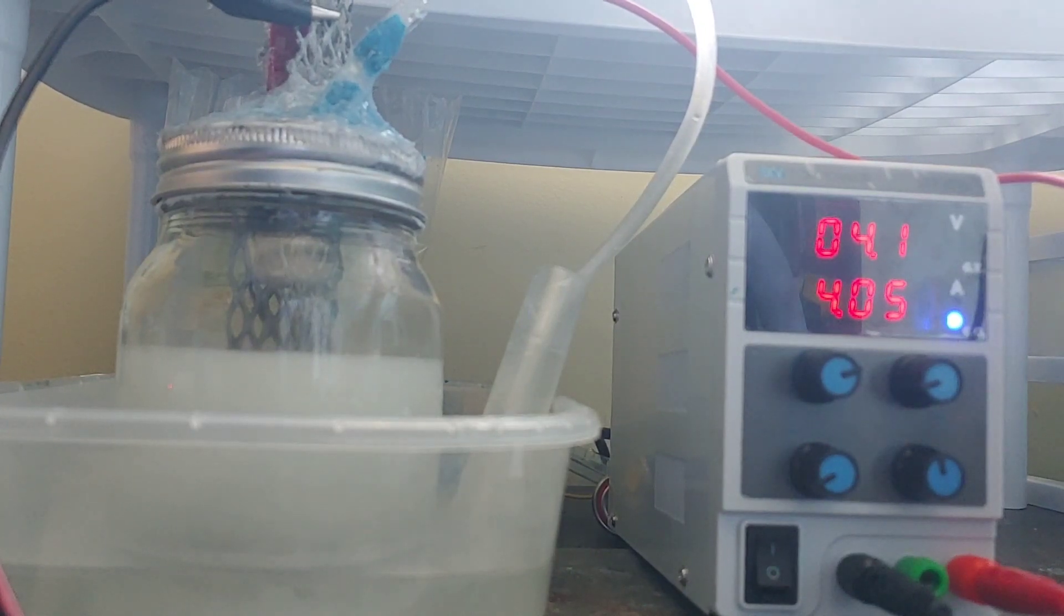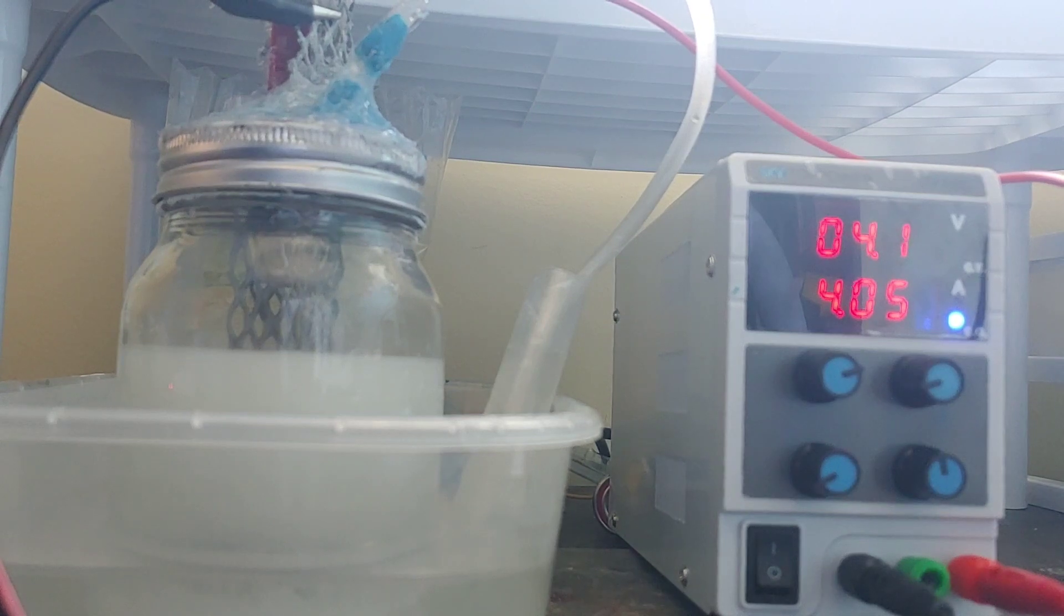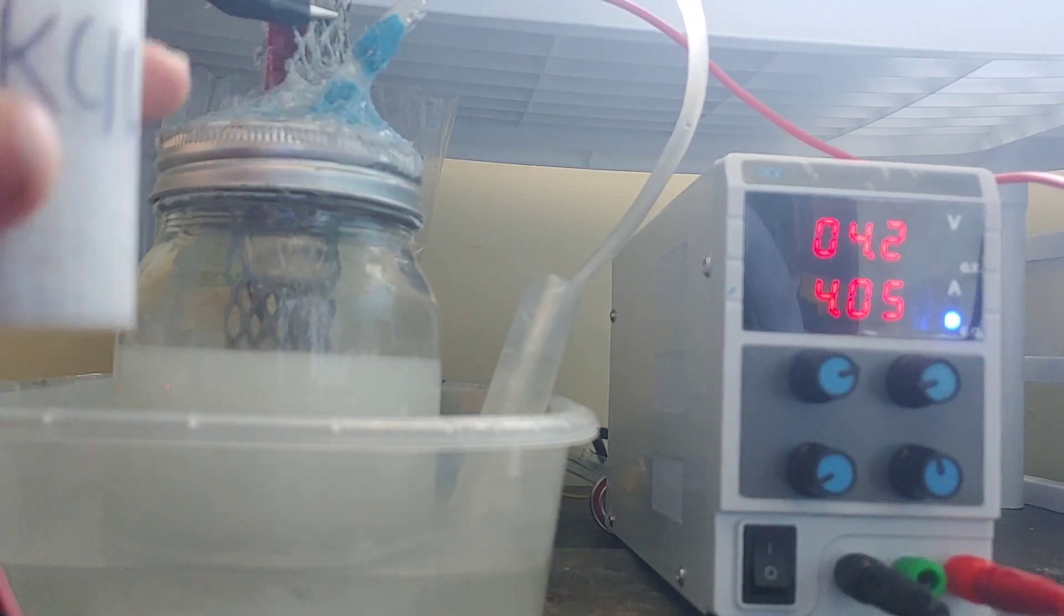This is like some silicates, I think. I'm not even sure. I think there's even some magnesium carbonate in there. And there was sugar, also. Sugar in all things, in the chlorate cell, you know, that's awful. So I recrystallized it, obviously. So there's no sugar in this, don't you worry.